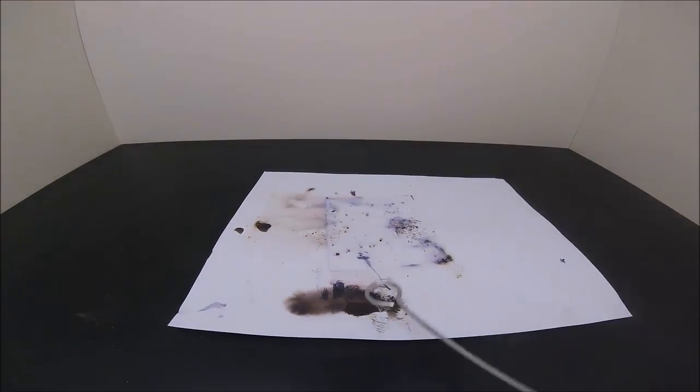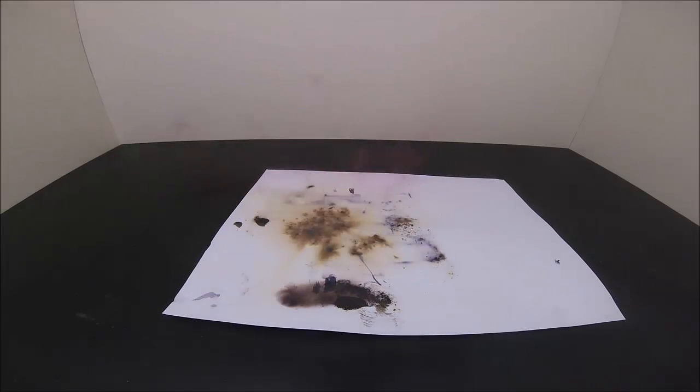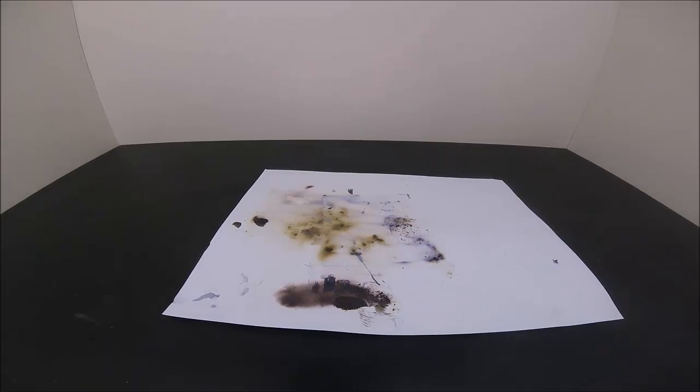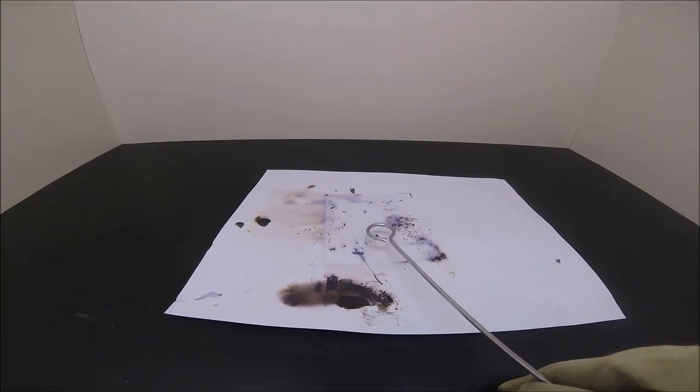There were some products left on this sheet, and I thought it would be fun to play with. It exploded and caused a sympathetic detonation. And here is the original audio.